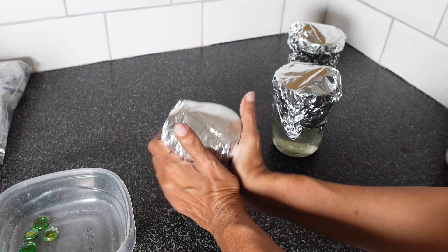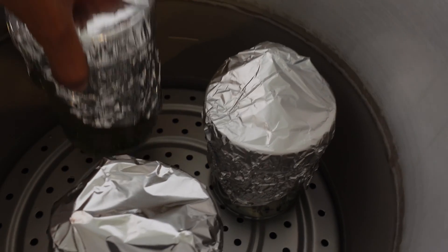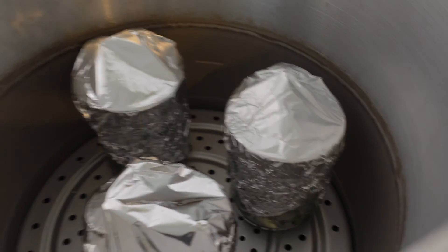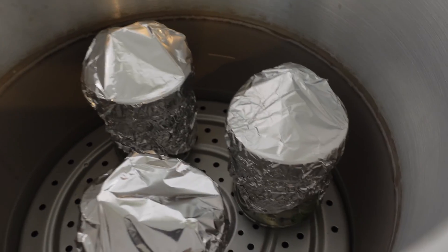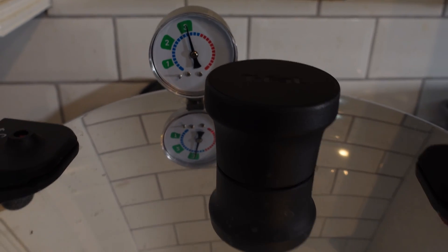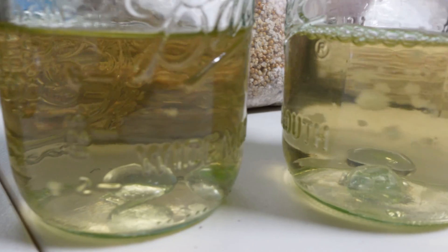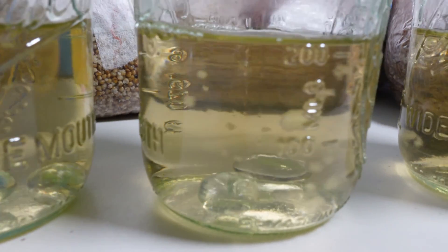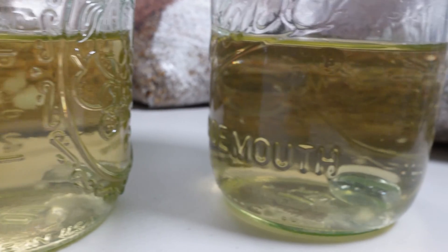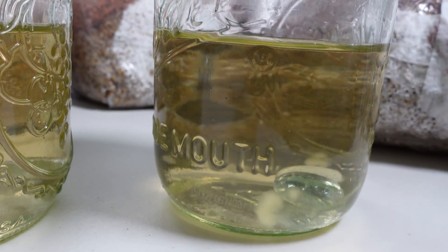The jars were covered with foil then placed into the pressure cooker for 30 minutes at 15 psi. The solution was cooled overnight before using it to make my spore culture. Be sure to stay tuned to see how this was done.